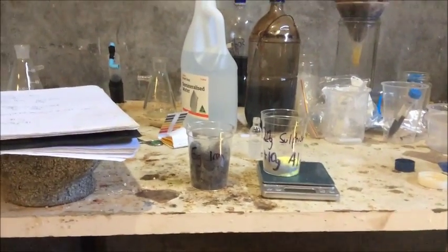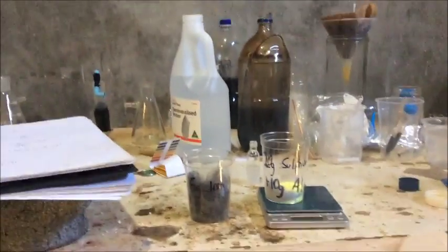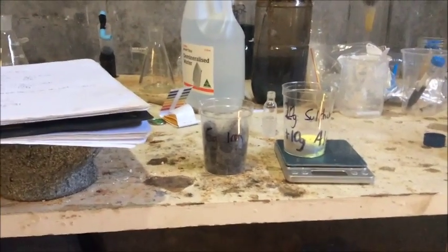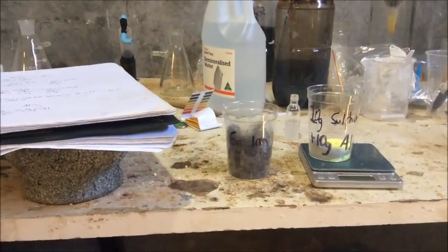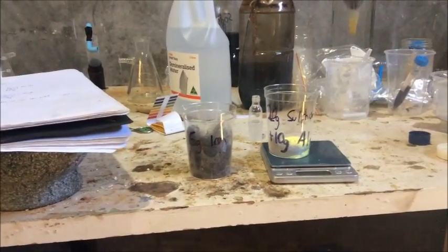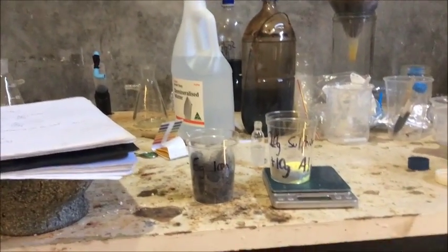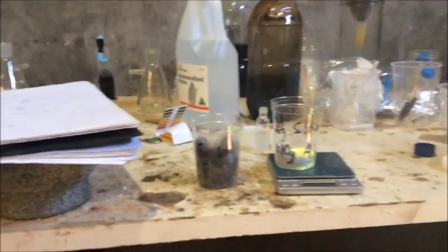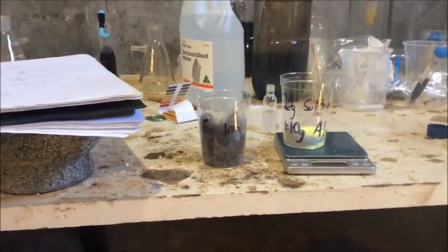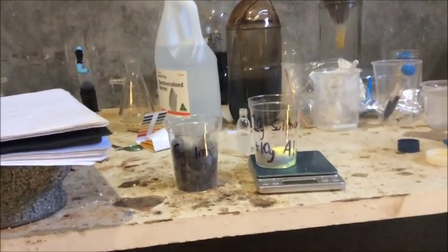This is starting from picric acid. Obviously you do start from aspirin, but I have word on the street that Doug's Lab is going to do an aspirin-to-picric-acid video, so I won't compete with that. The main reason is I have picric acid already — I made it a few months ago — and there are quite a few good videos on aspirin to picric acid already.